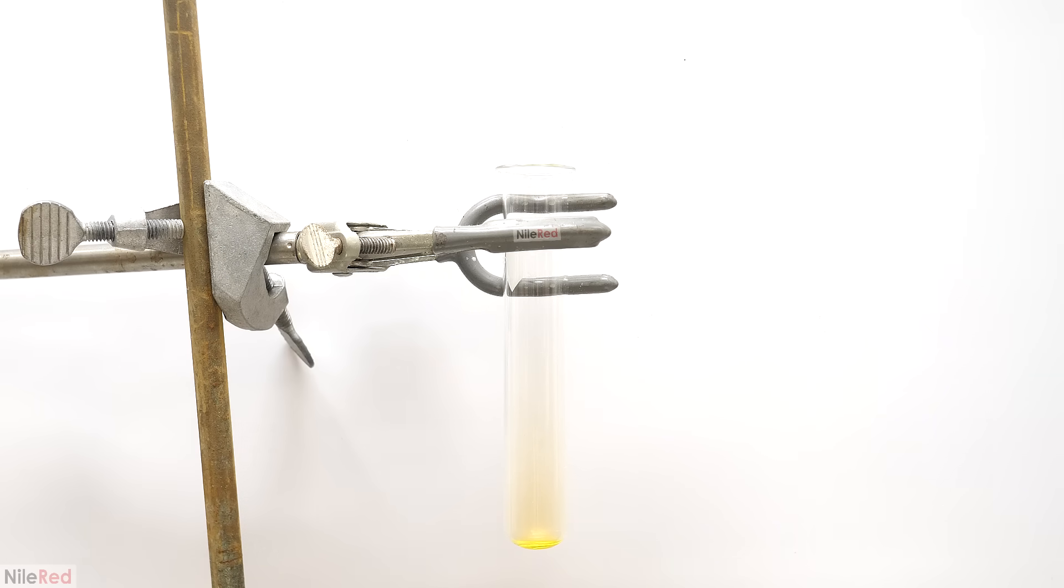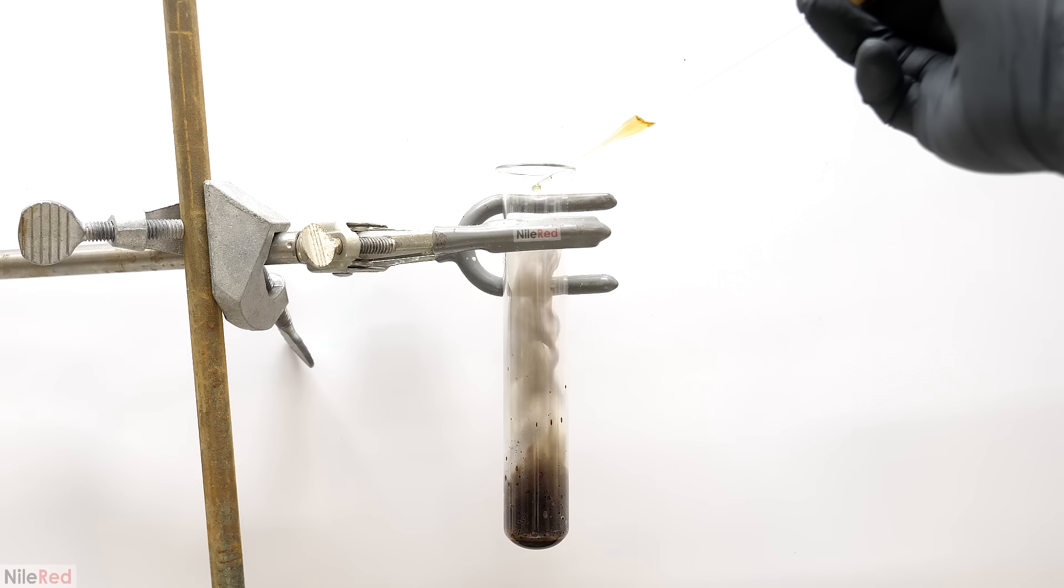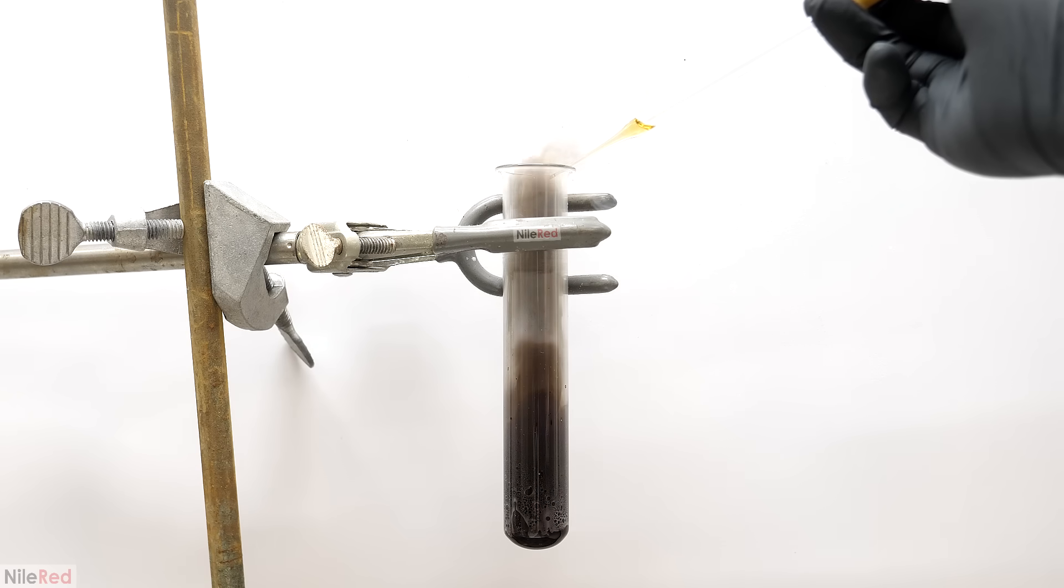I decided to try it again, but this time, I added a lot more aniline. Initially, it was just like before and it just caused it to boil, but then it suddenly ignited.